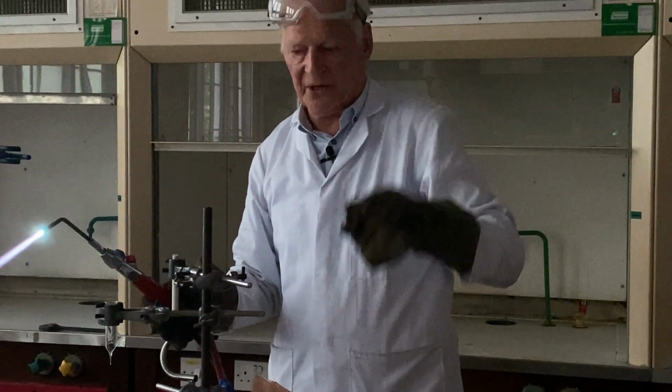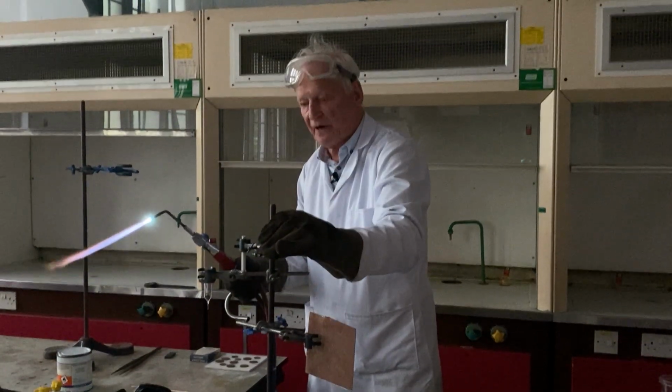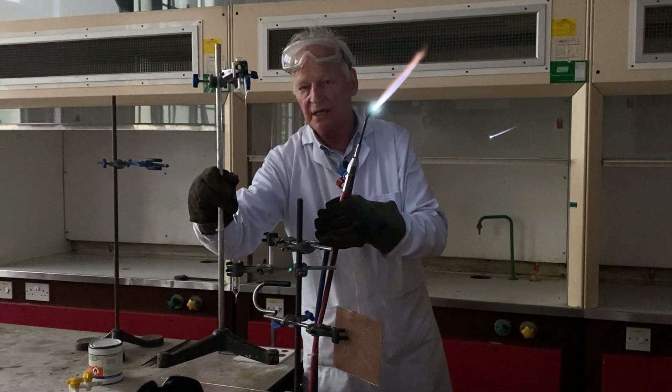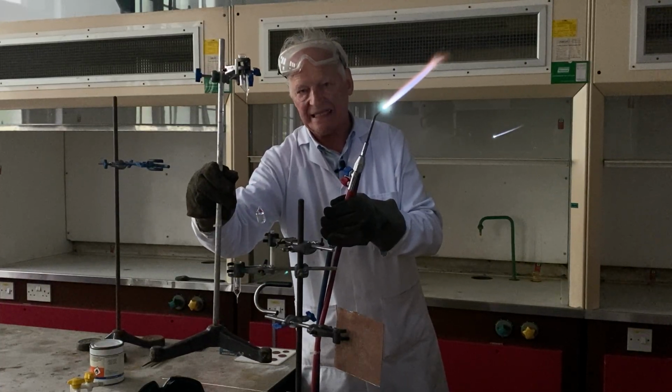It went right down. It went to the ground. I overcooked it, but there it is broken. However, I have got a sample that I made earlier, because this is exceptionally difficult, but there you see a sample which I made earlier, which I managed to get exactly at the right level.